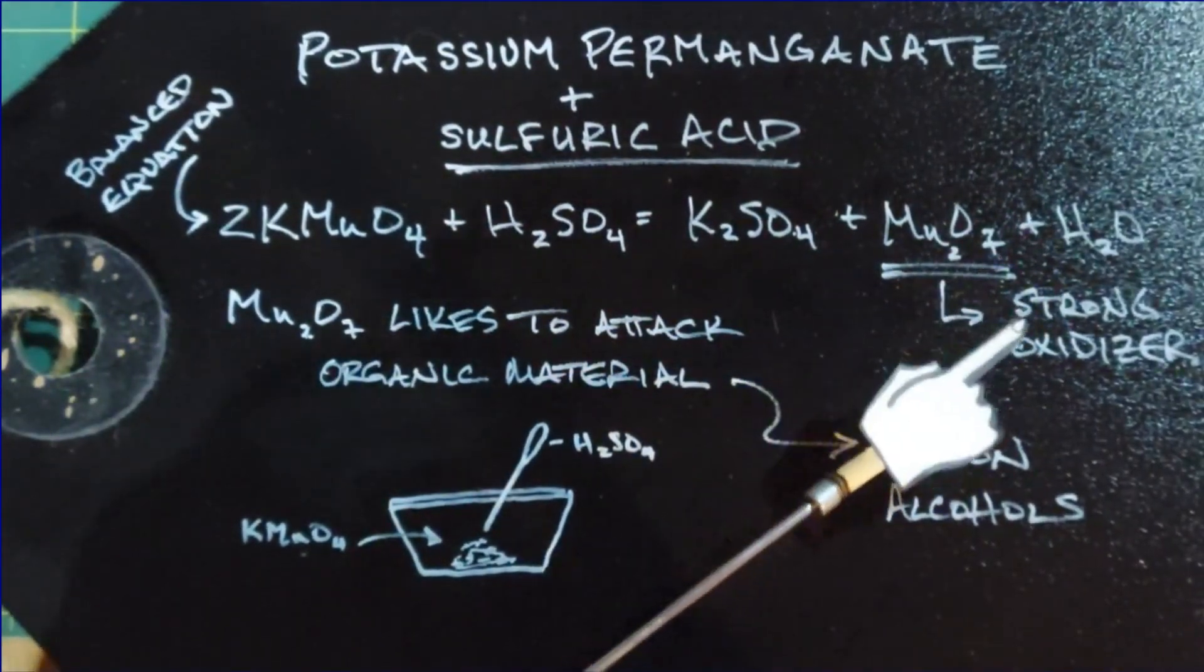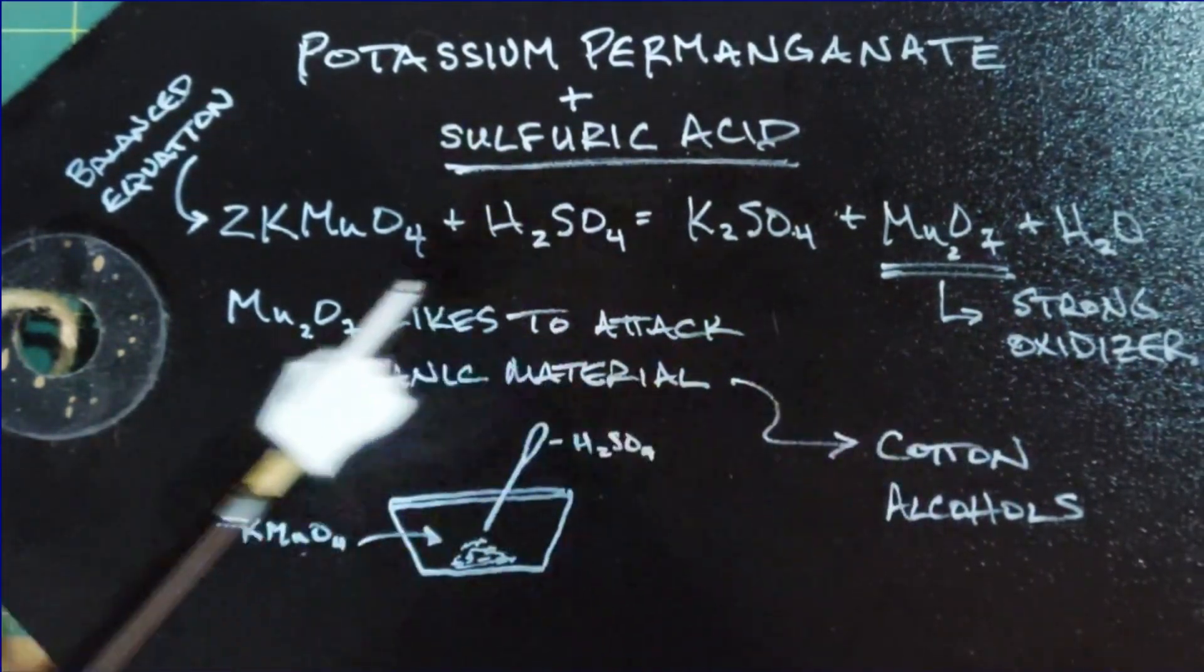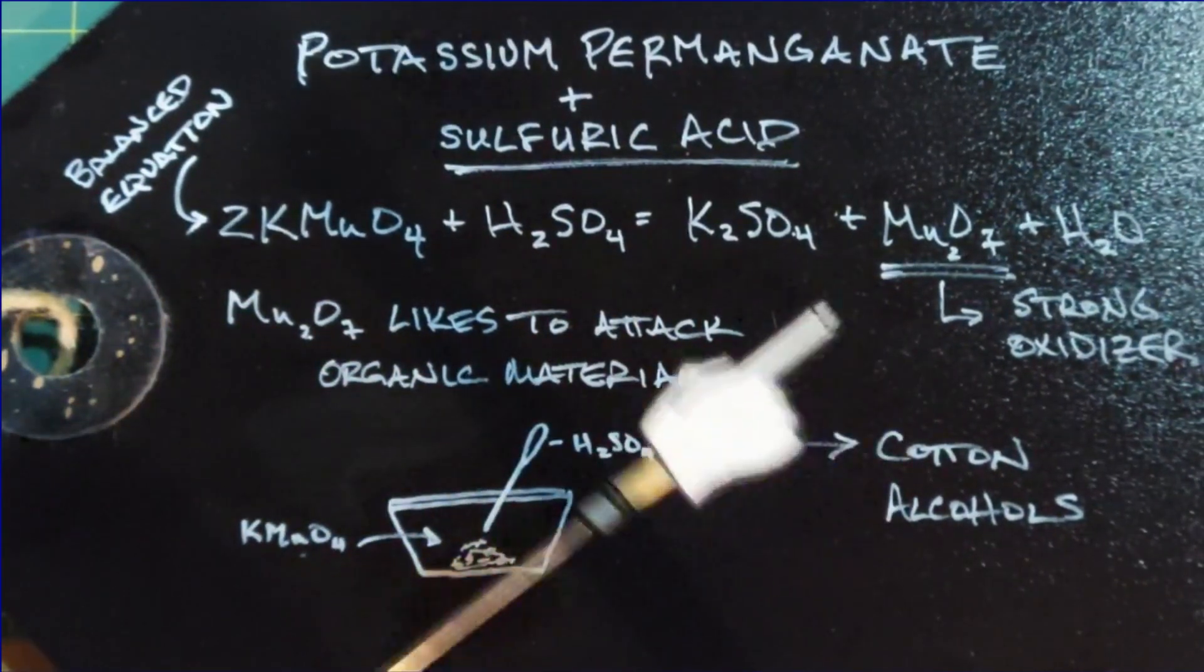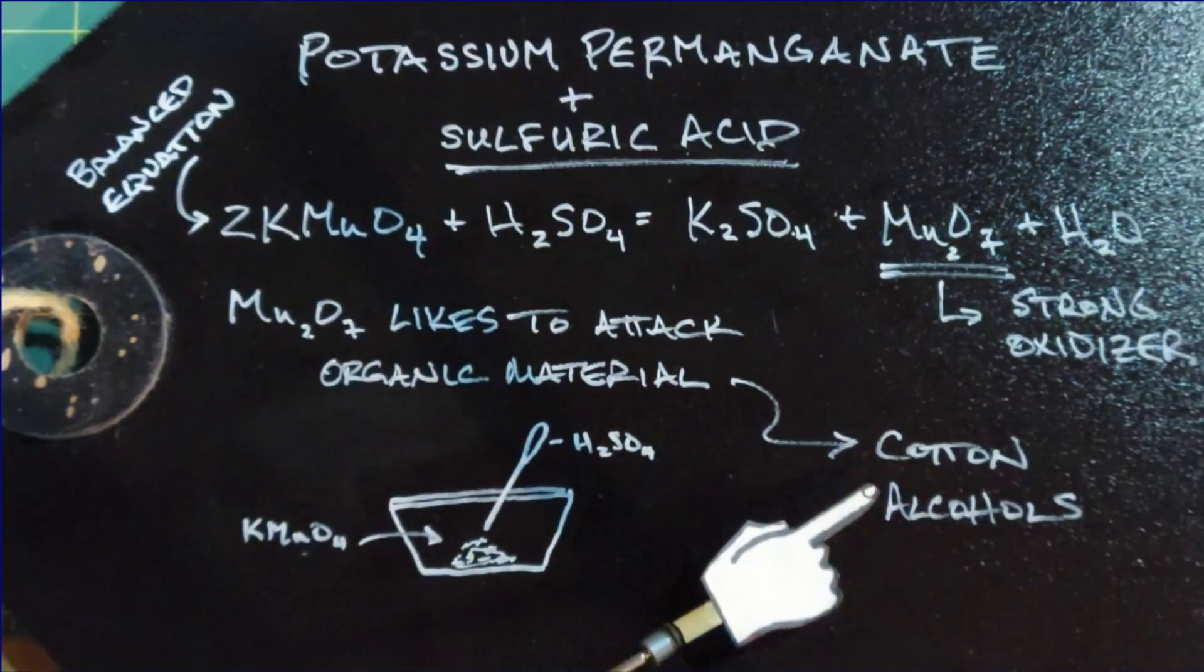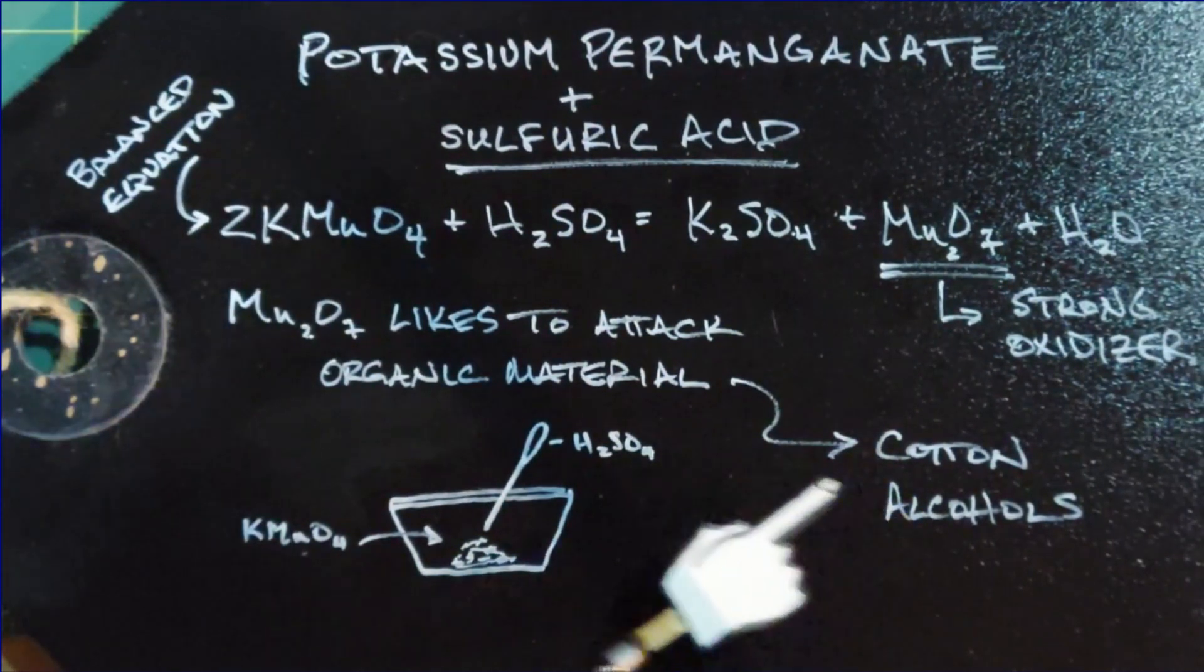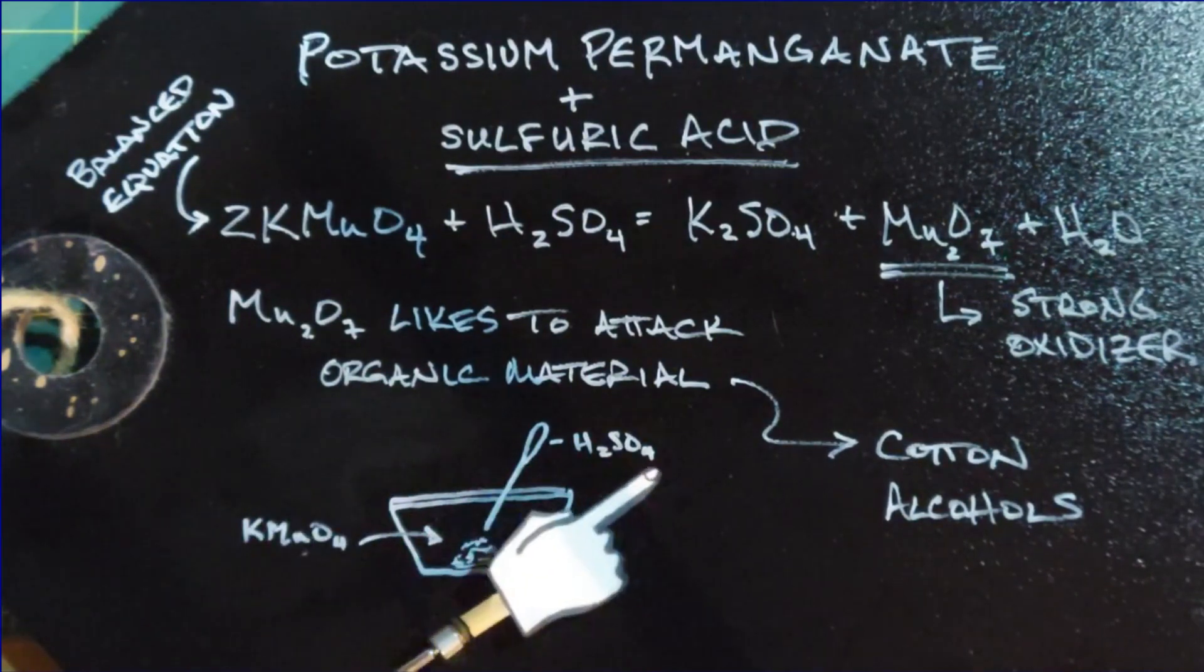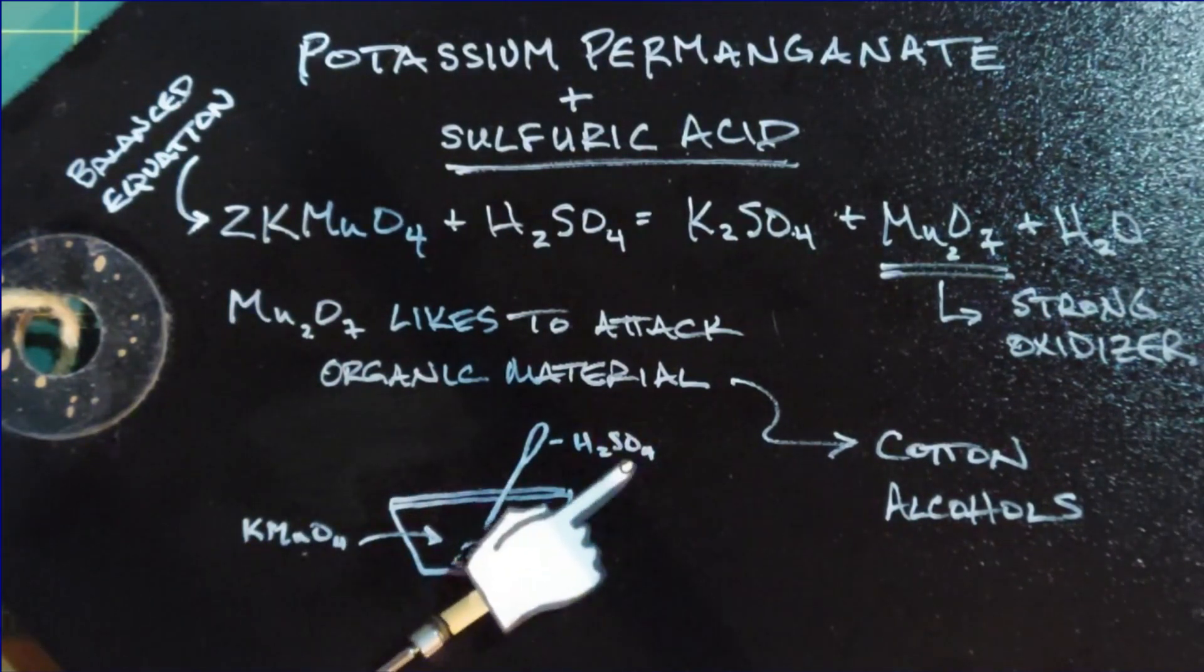Manganese heptoxide is a very strong oxidizer and it likes to attack organic material. So we're going to use cotton and we'll also use a couple different types of alcohol and see what happens when they're put in this mix of KMnO4, potassium permanganate, and H2SO4, also known as sulfuric acid.